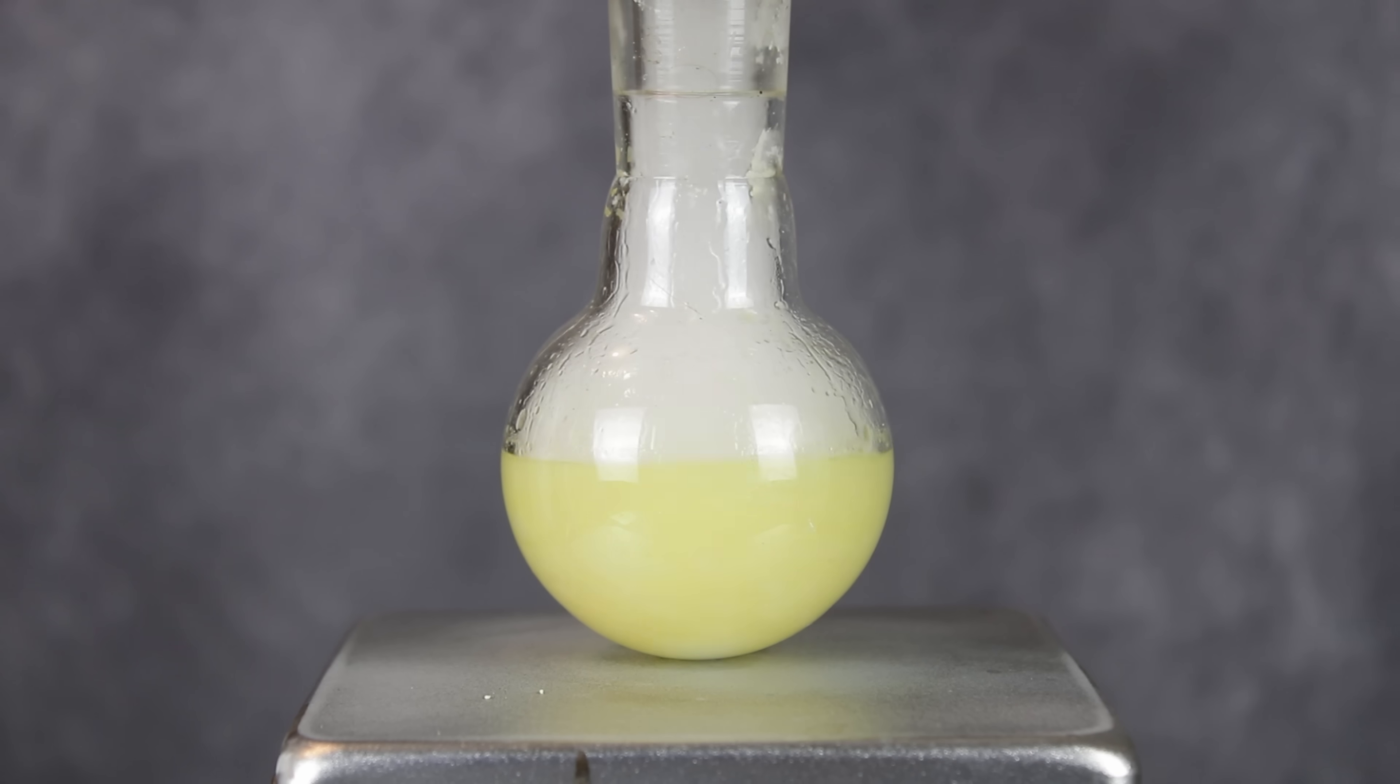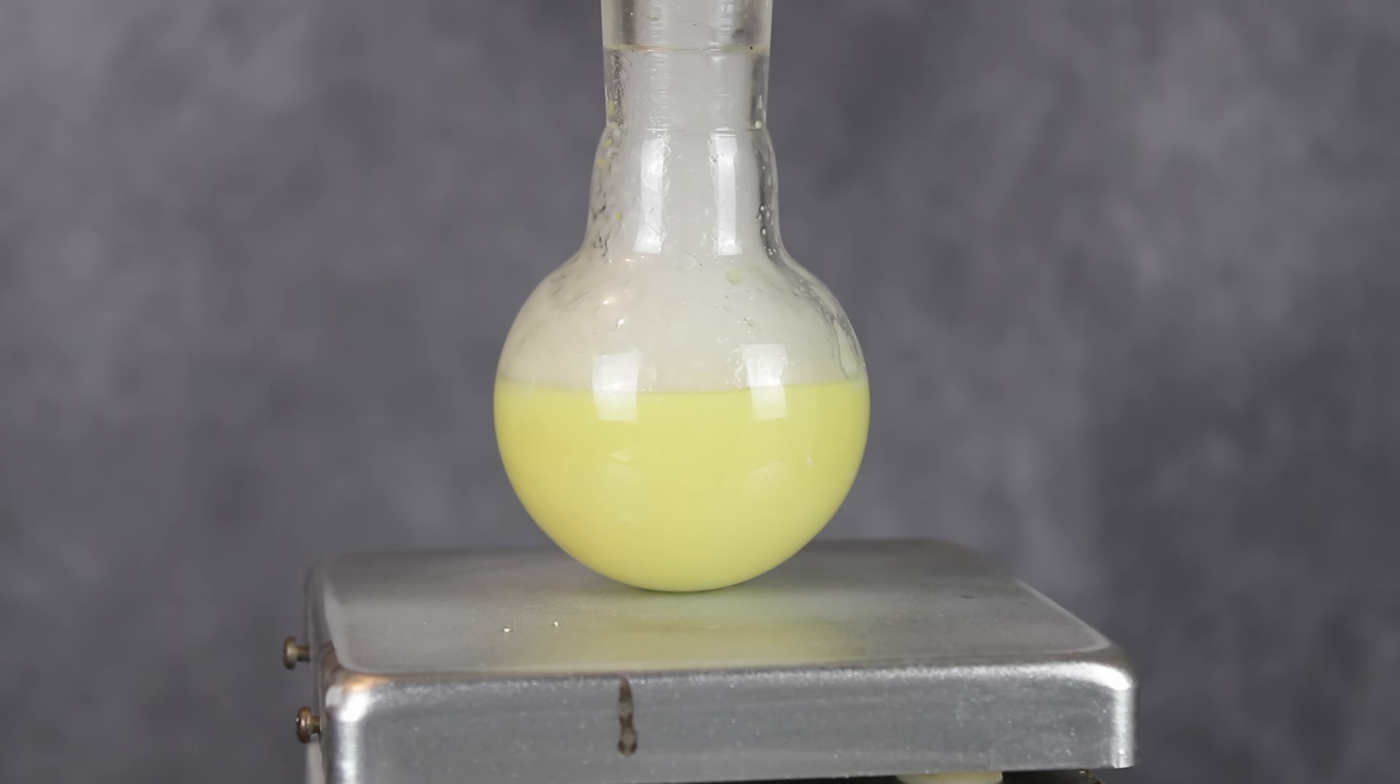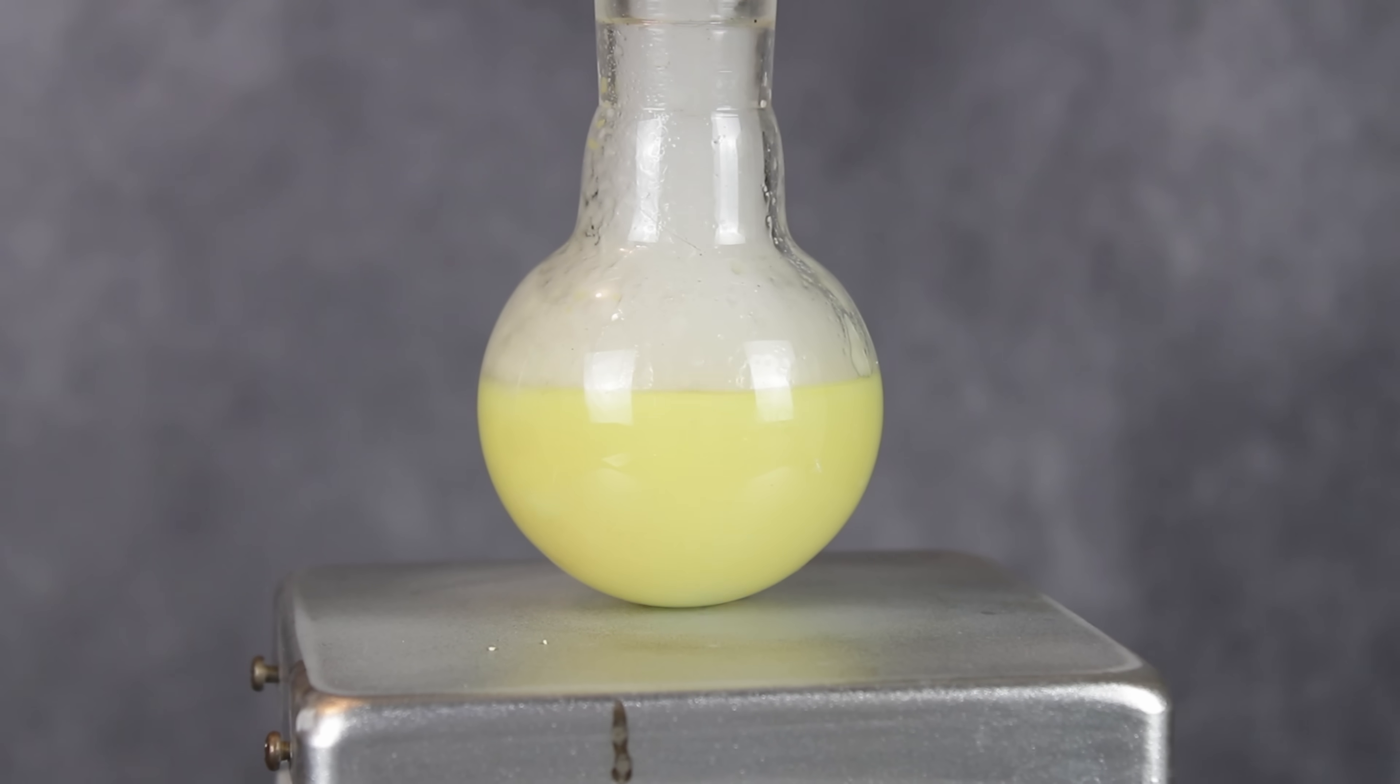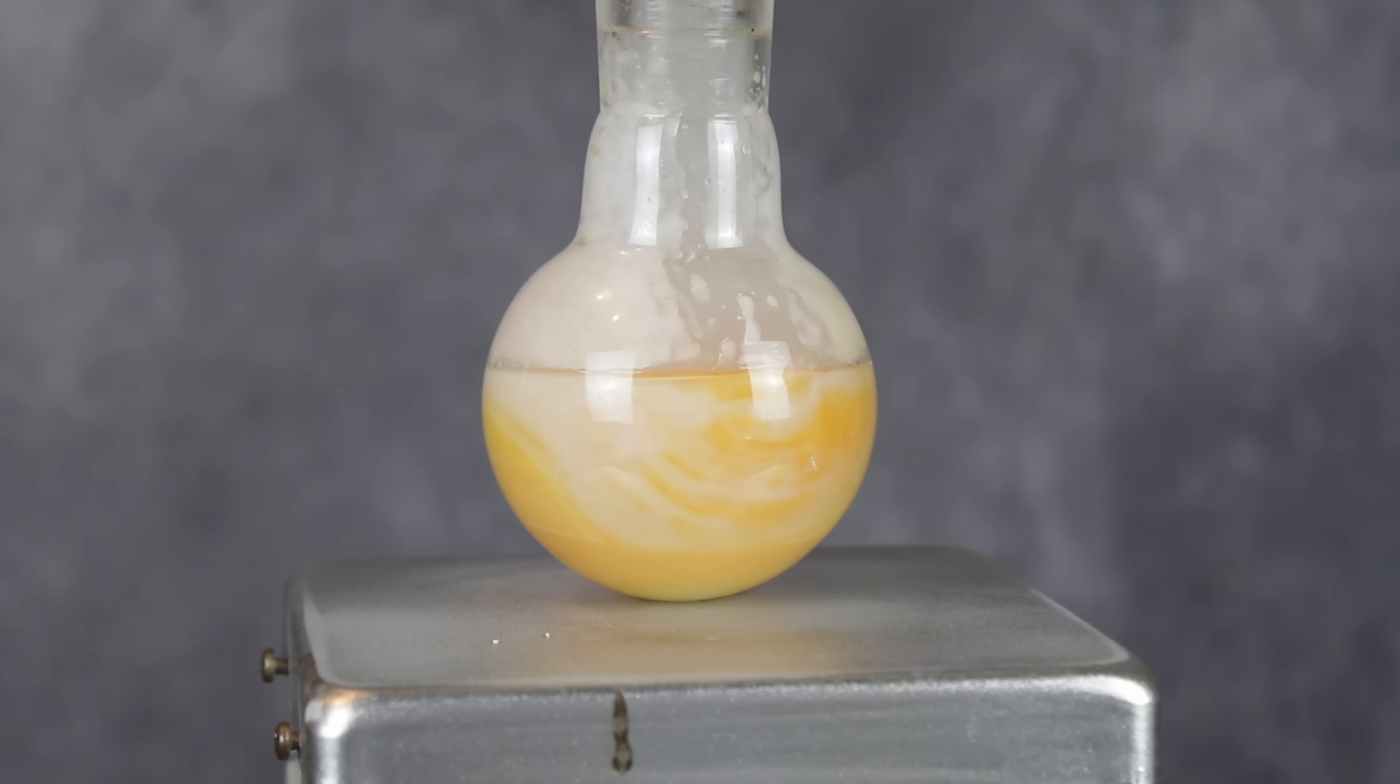In this reaction, the nicotinoyl chloride hydrochloride reacts directly with diethylamine to form nikethamide and hydrogen chloride. It's a pretty straightforward reaction that's pretty hard to mess up, although the presence of water can decrease the yield slightly by converting the acid chloride back into nicotinic acid. The final mix came out as a thick sludge, thanks to all the precipitated diethylamine hydrochloride.